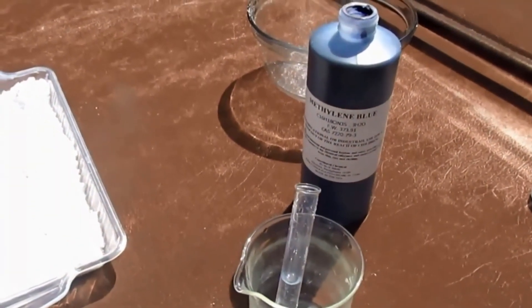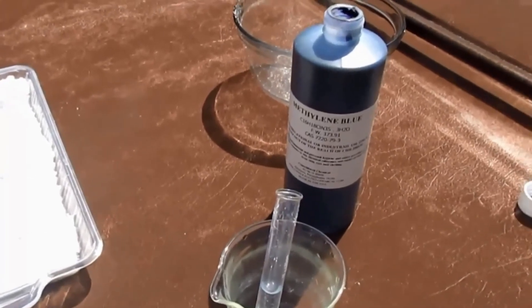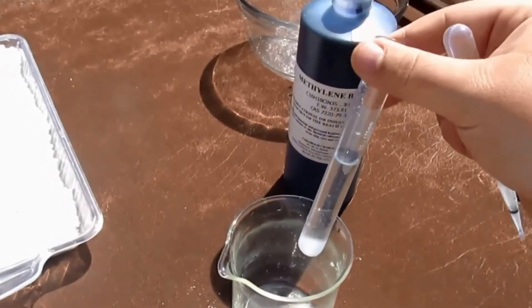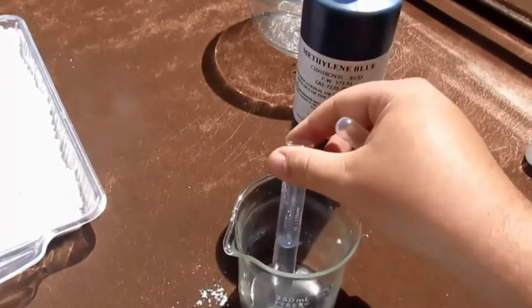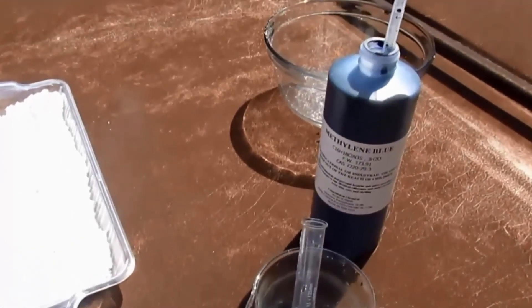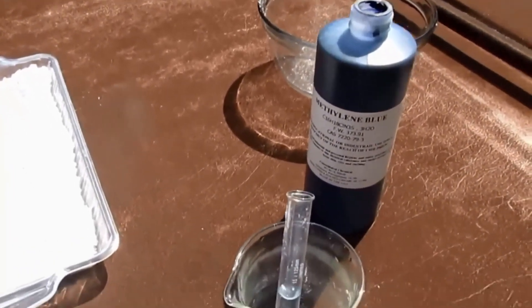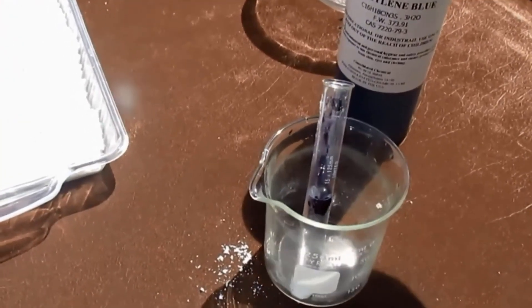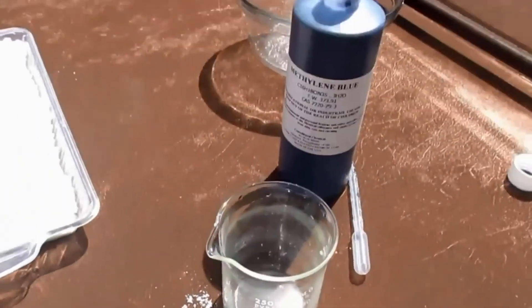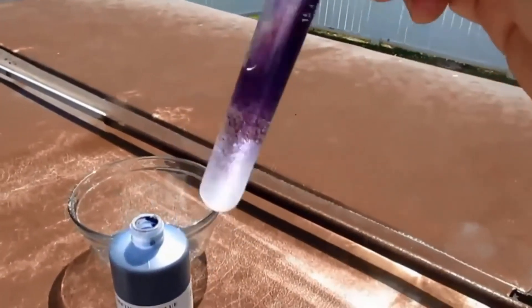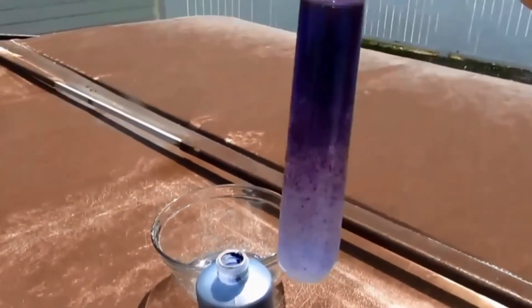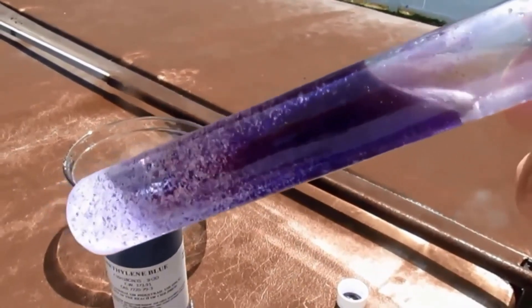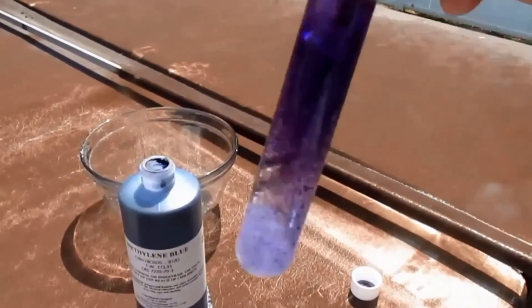Now, just to conclude that this is potassium perchlorate, I mixed some of the potassium perchlorate with water and shook it vigorously to dissolve a small amount. This is potassium perchlorate. The violet precipitate and color indicates that this is potassium perchlorate.